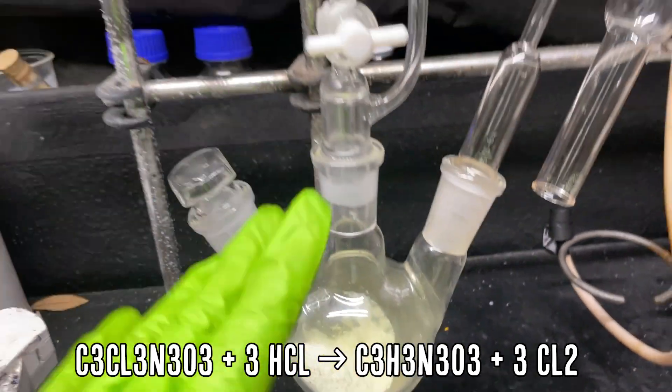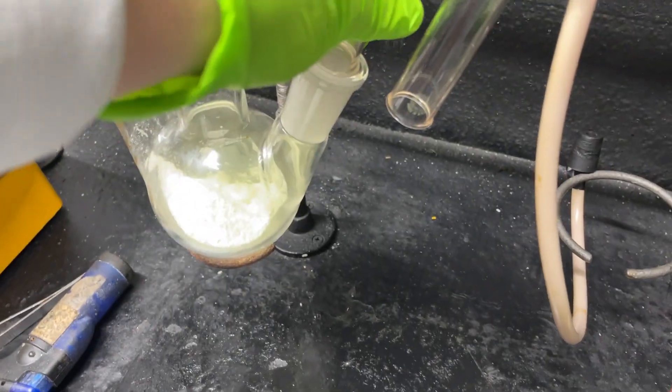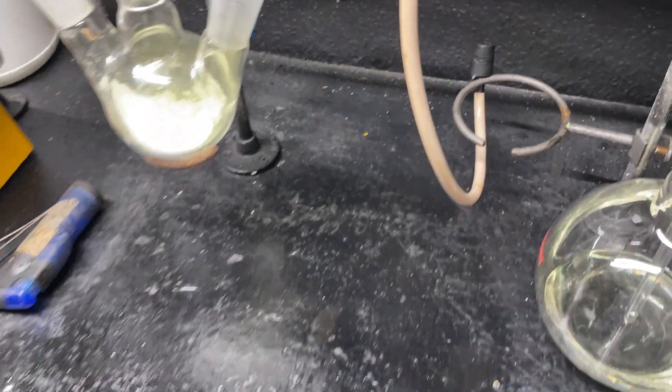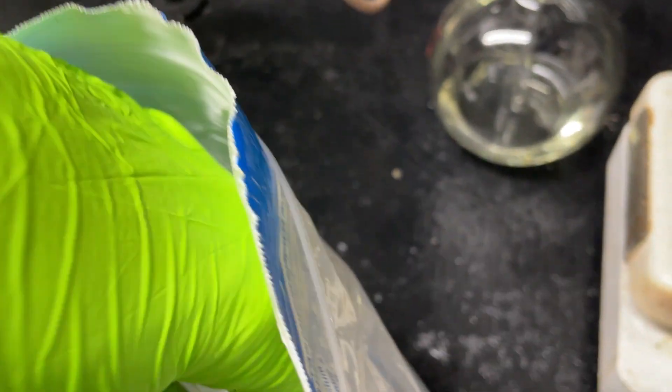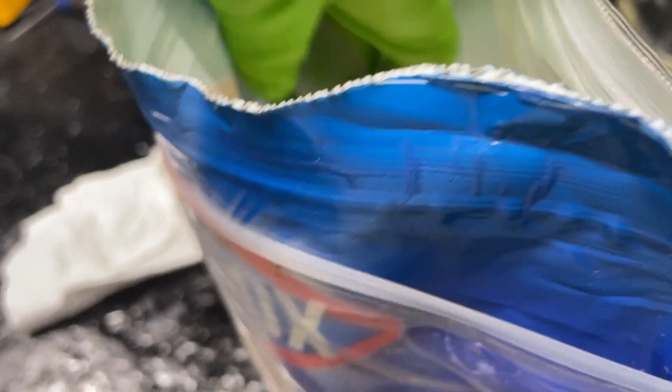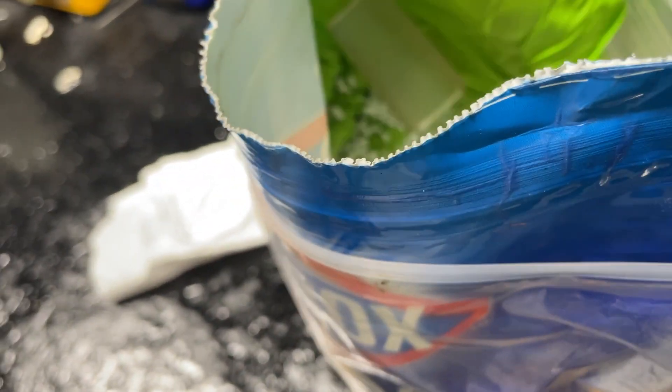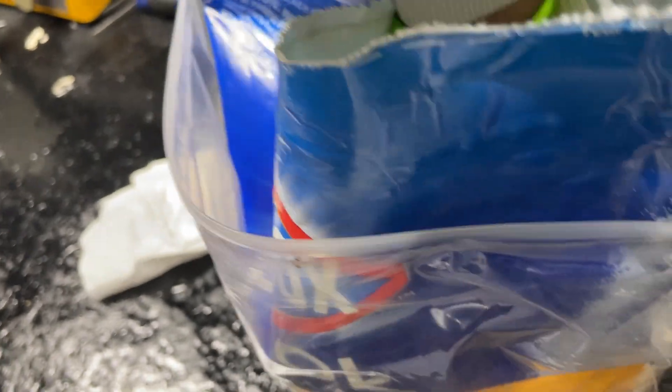Because some of it accidentally spilled down the pressure equalizer but that's fine. Chlorine gas is also highly toxic so don't do this. I'm going to take this off for a second and fill this with calcium chloride, anhydrous calcium chloride, because this is a drying agent - means it dries things.